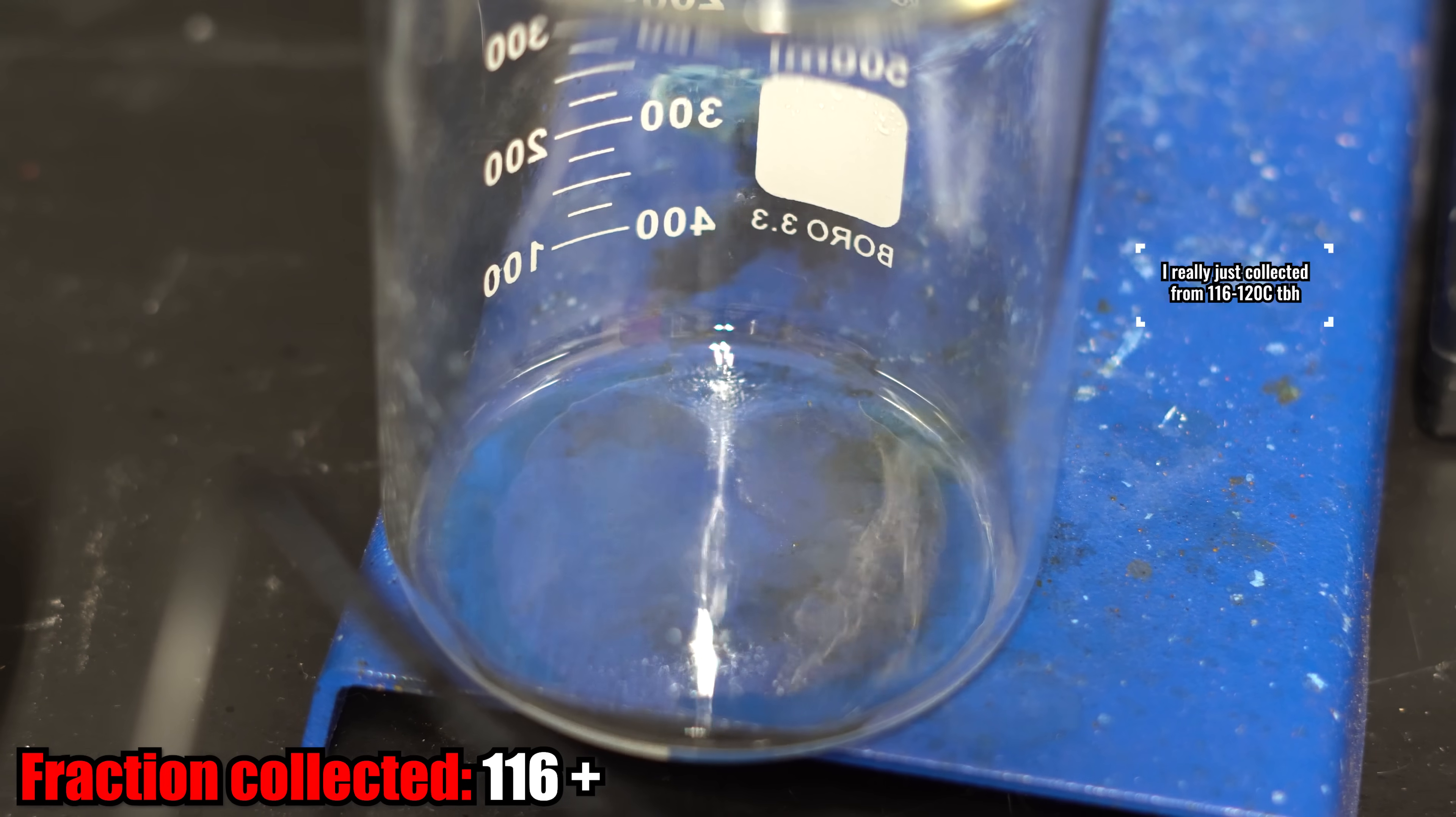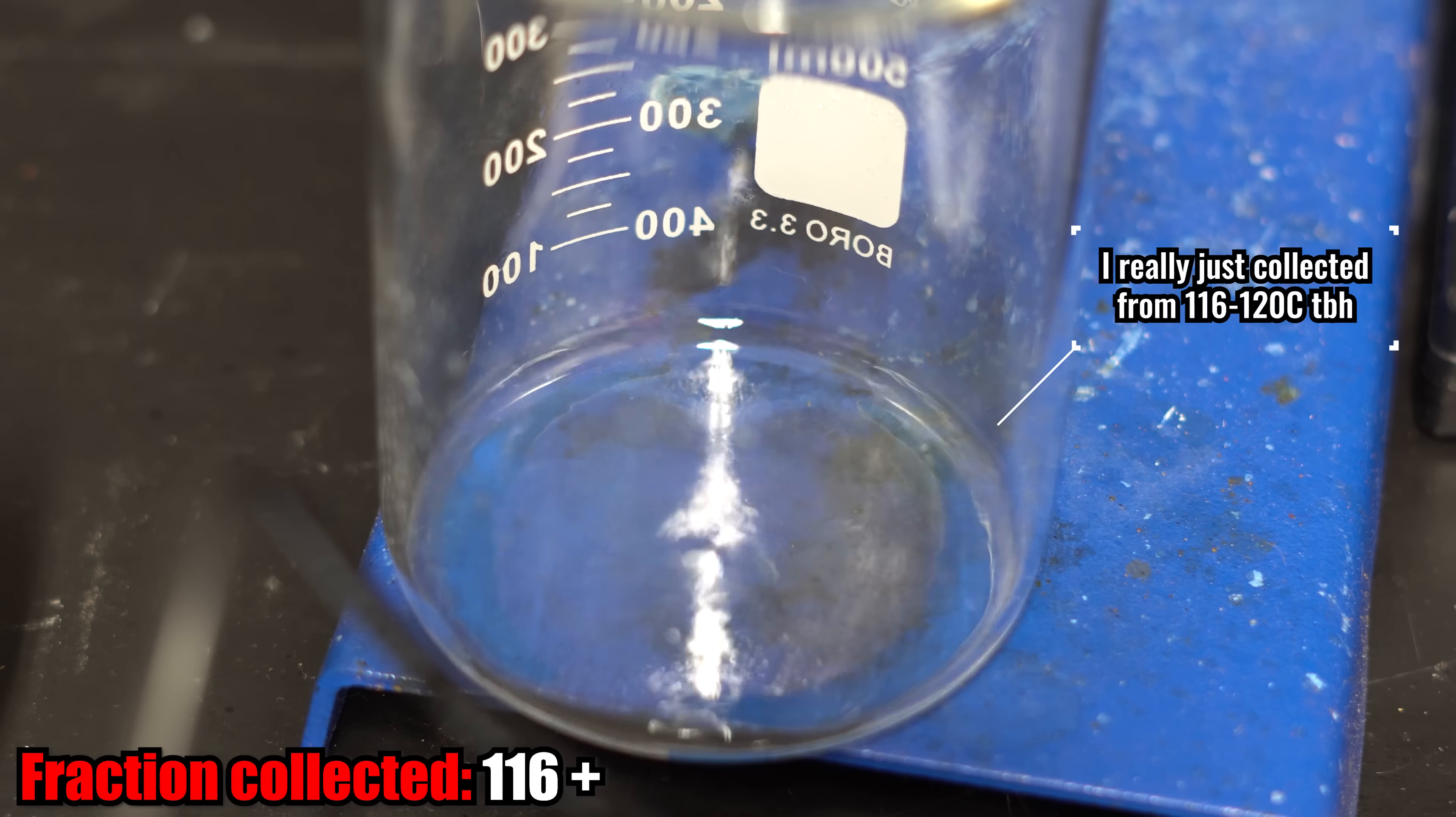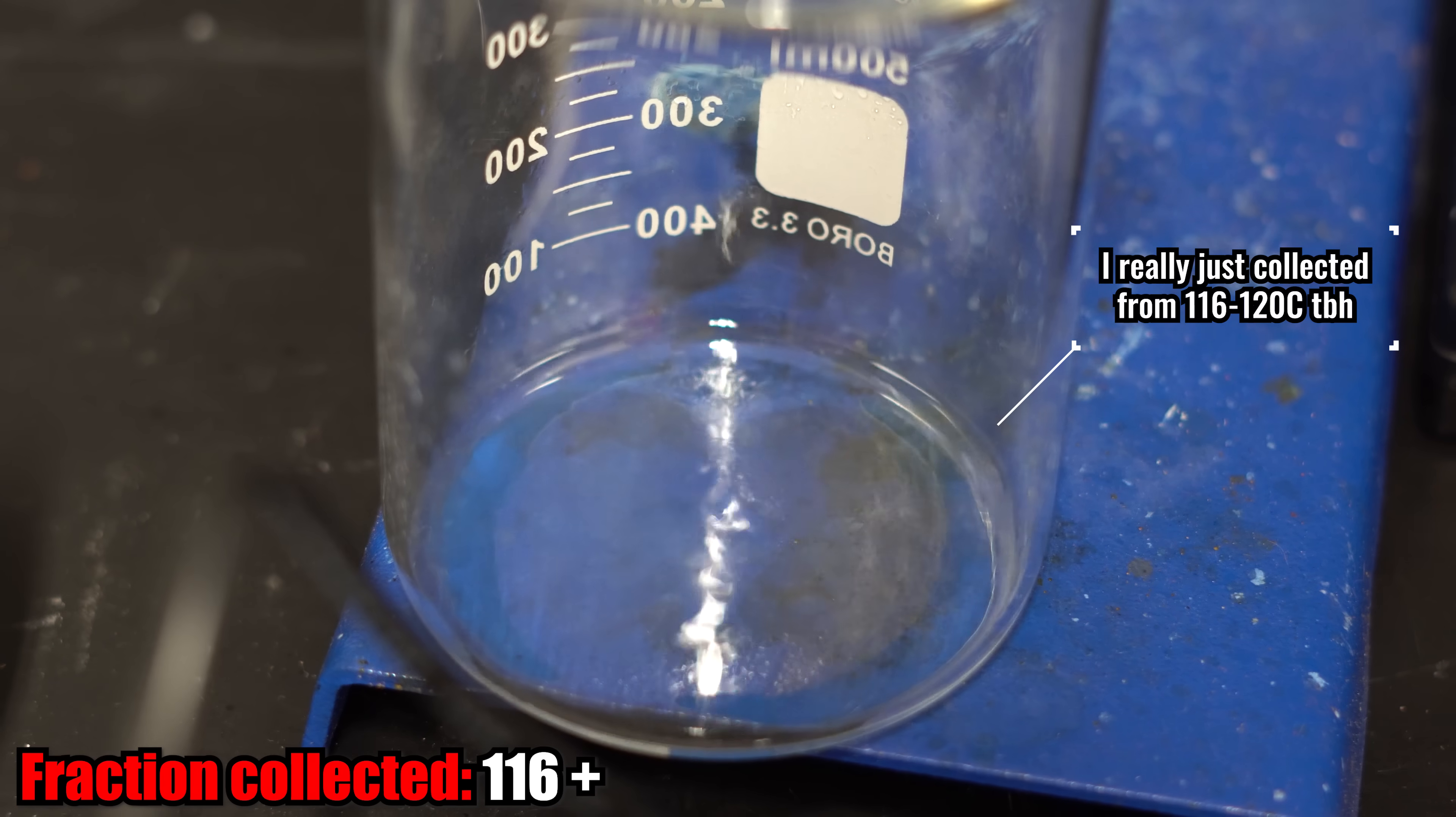Once the temperature reached 116 degrees Celsius, I switched the flask out just for a simple beaker. This should be the butan-1-ol, but likely there's a little bit of nitroethane in it. I'm also going to save this and put this back into the bottle.